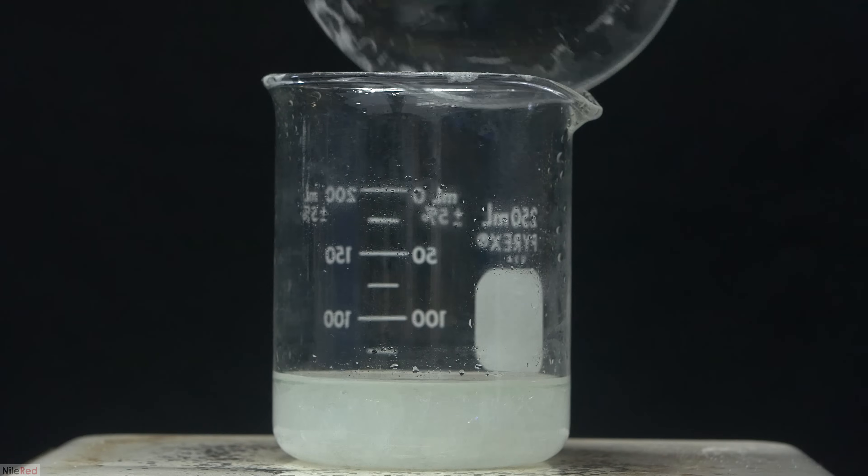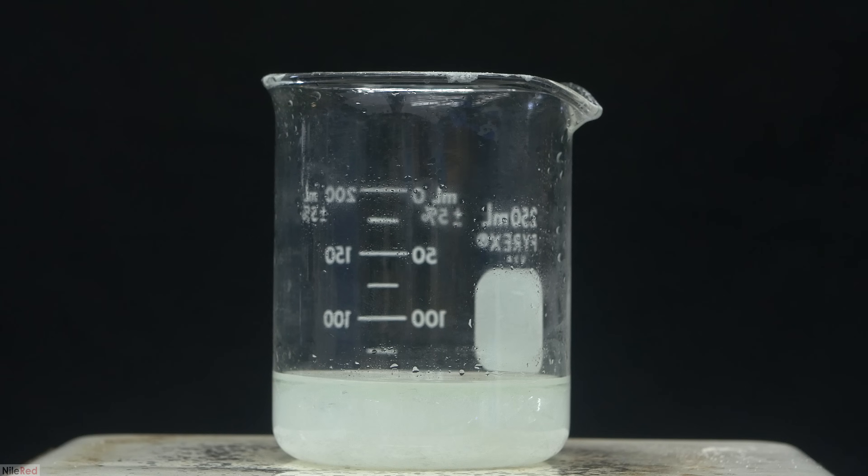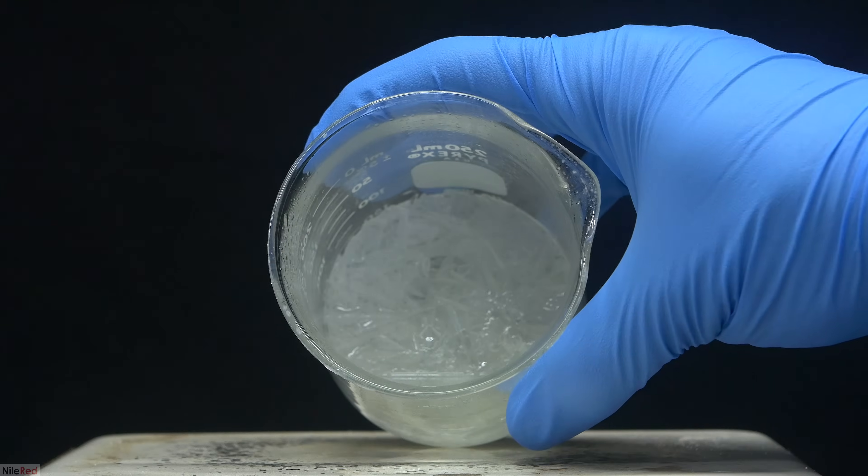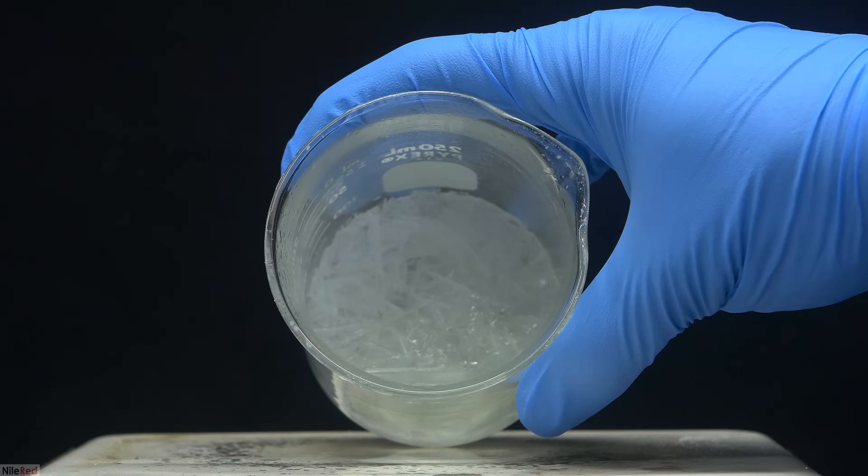Once it looks like the crystallization is complete, the solution is placed into a freezer. When the beaker is tilted on the side, you can see all of the nice crystals that have formed.